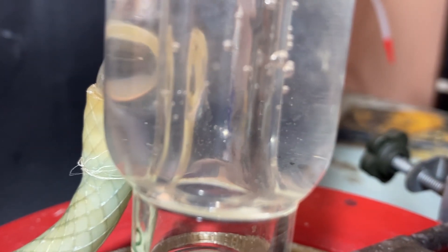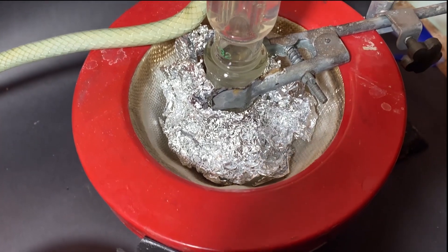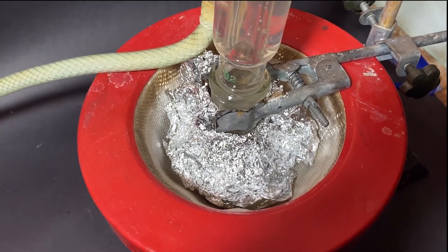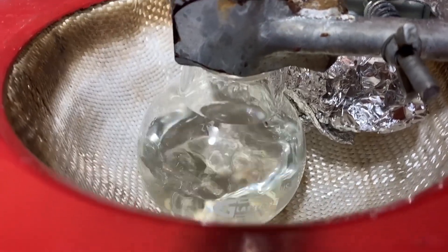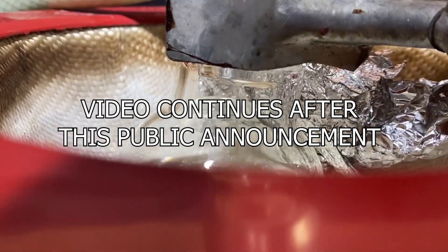You can see the water vapor condensing on the walls and I've eventually added some aluminum foil to thermally insulate the flask. Around one and a half hours in, I've deemed the reaction to be mostly complete.